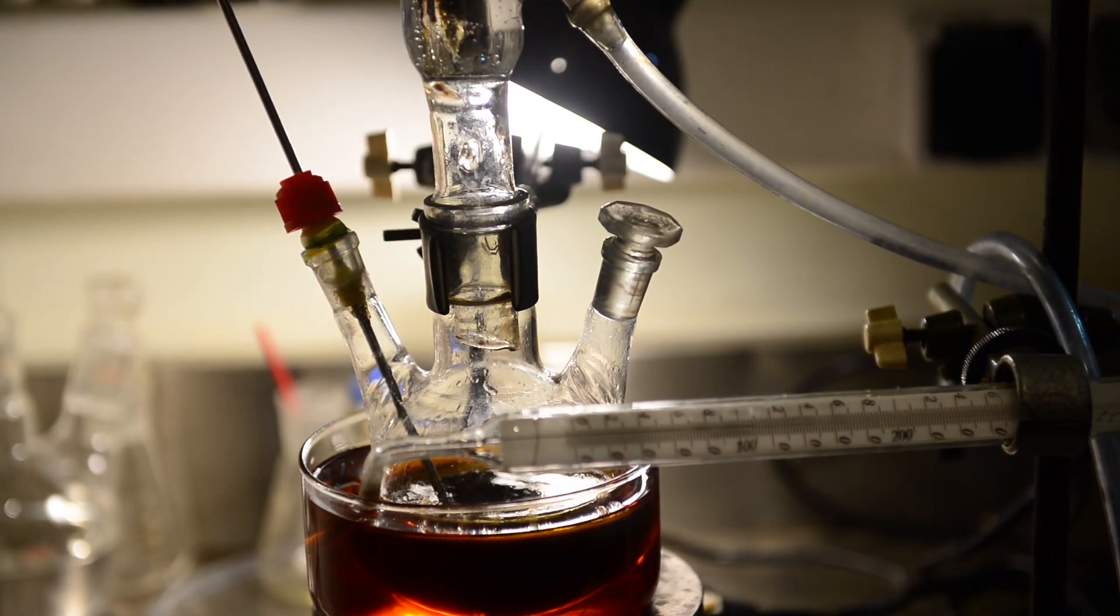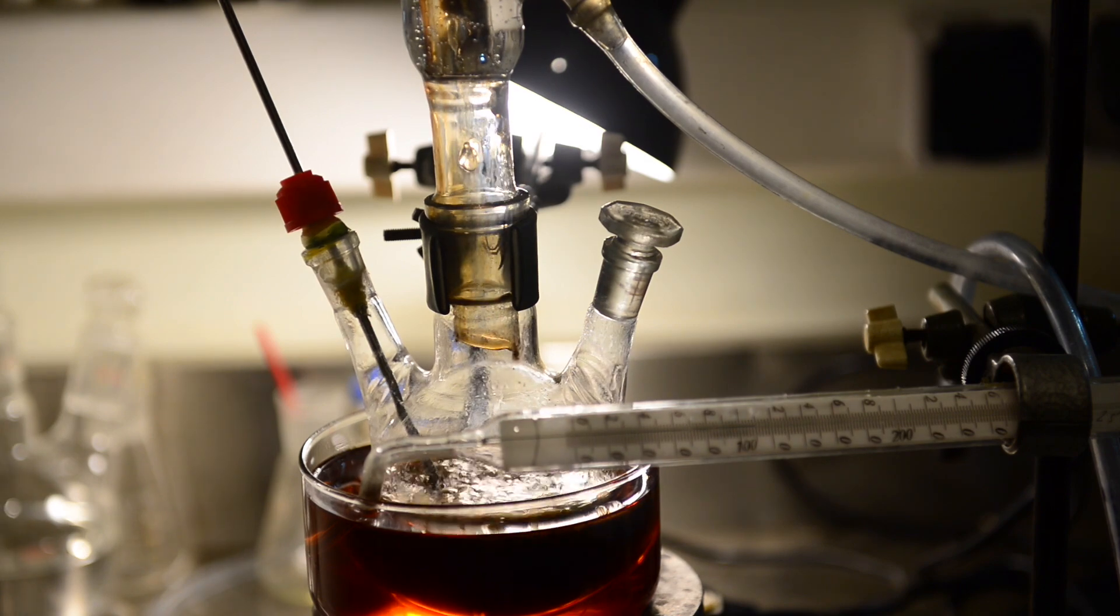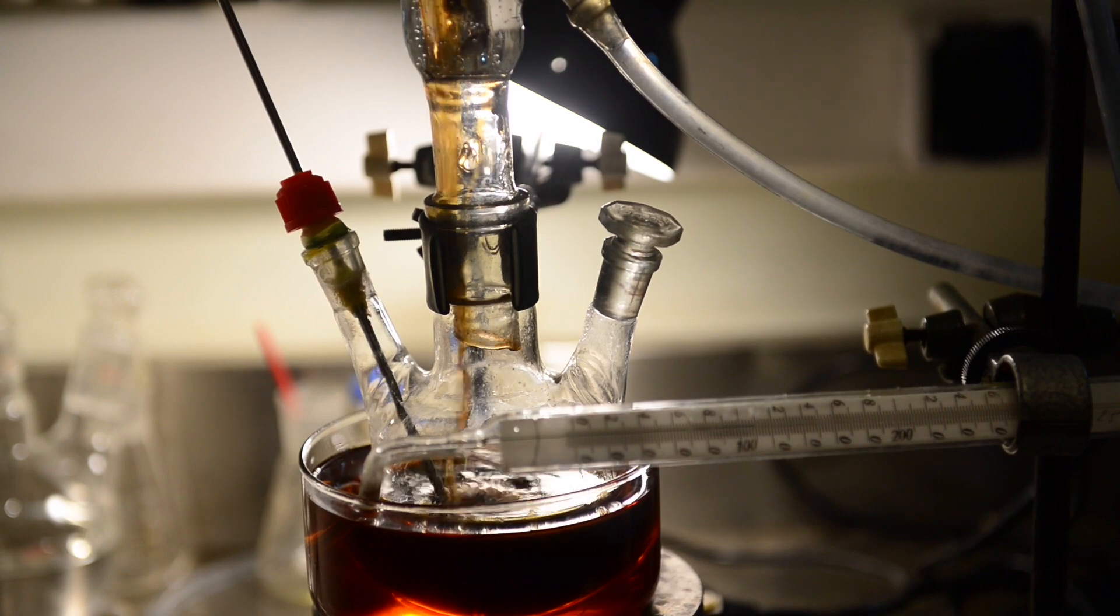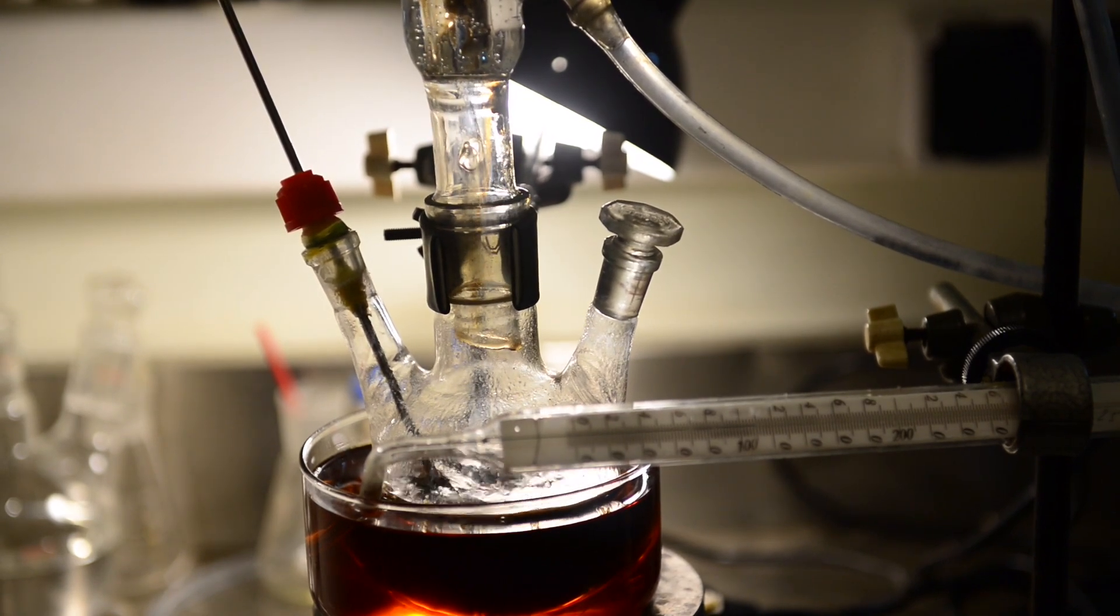Before changing the setup we have decided to cool the reaction mixture down and add some water. We are adding 100 milliliters of water. Water addition is causing vigorous boiling like last time.